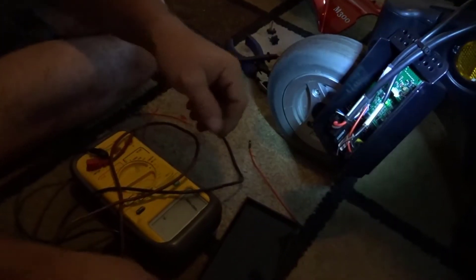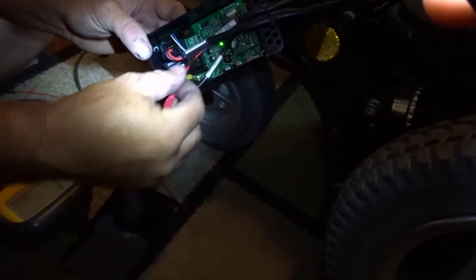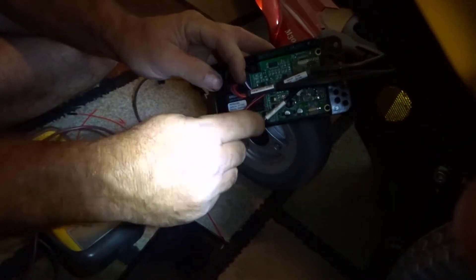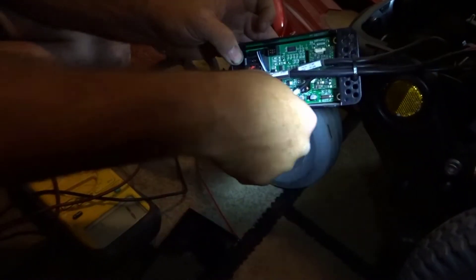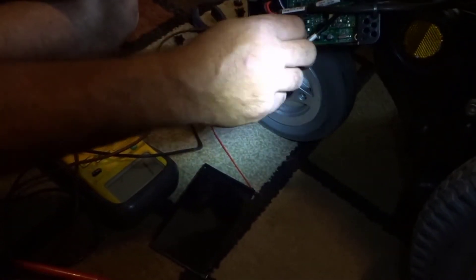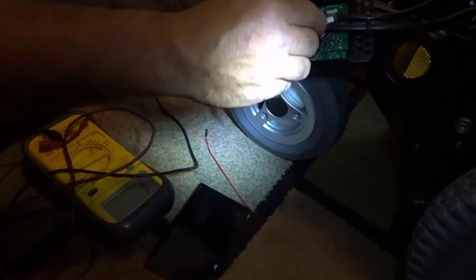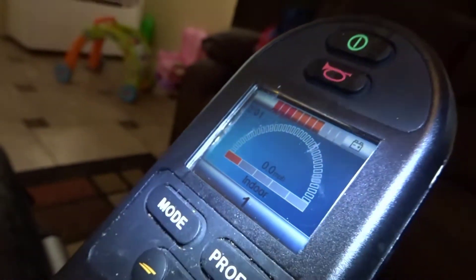I don't care about fixing that switch — I'm just going to bypass it. She doesn't need turtle mode. She's seven years old, she can just go fast all the time even if the seat is reclined a little bit. It has a speed control already. It's putting it in turtle mode because you have the seat reclined — kind of like a scissor lift, if you're not all the way to the ground a lot of them stay in turtle mode. So now we've taken the turtle mode off and we have full power, full power all the time.